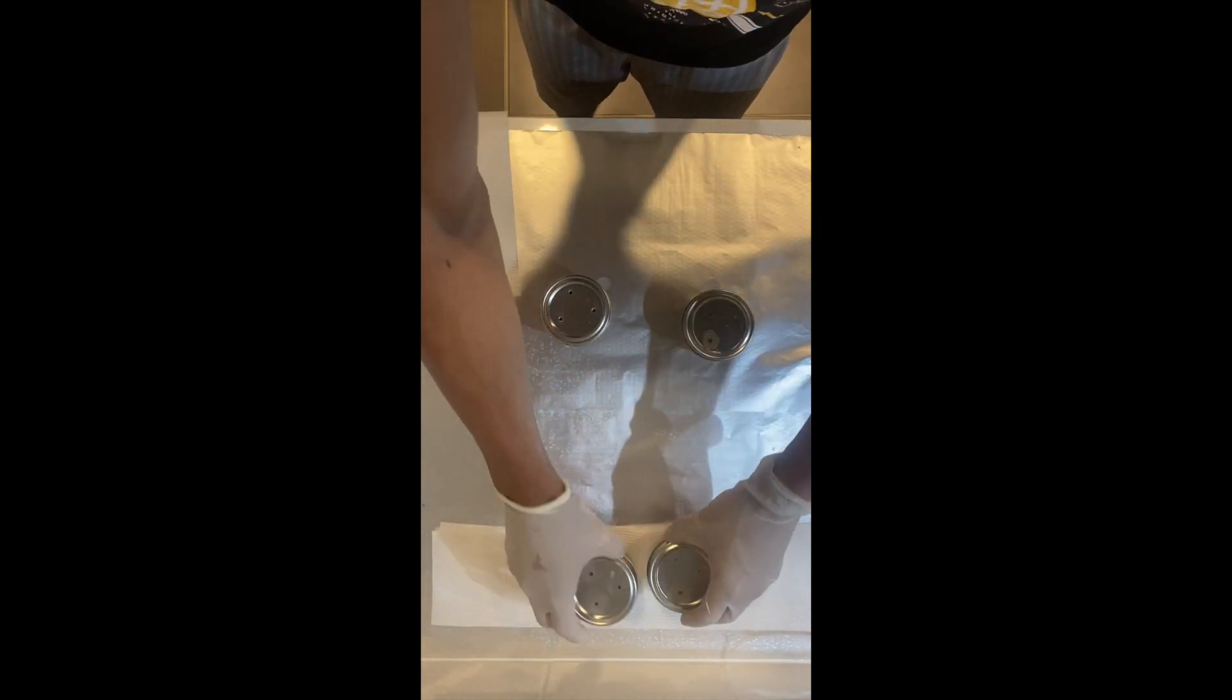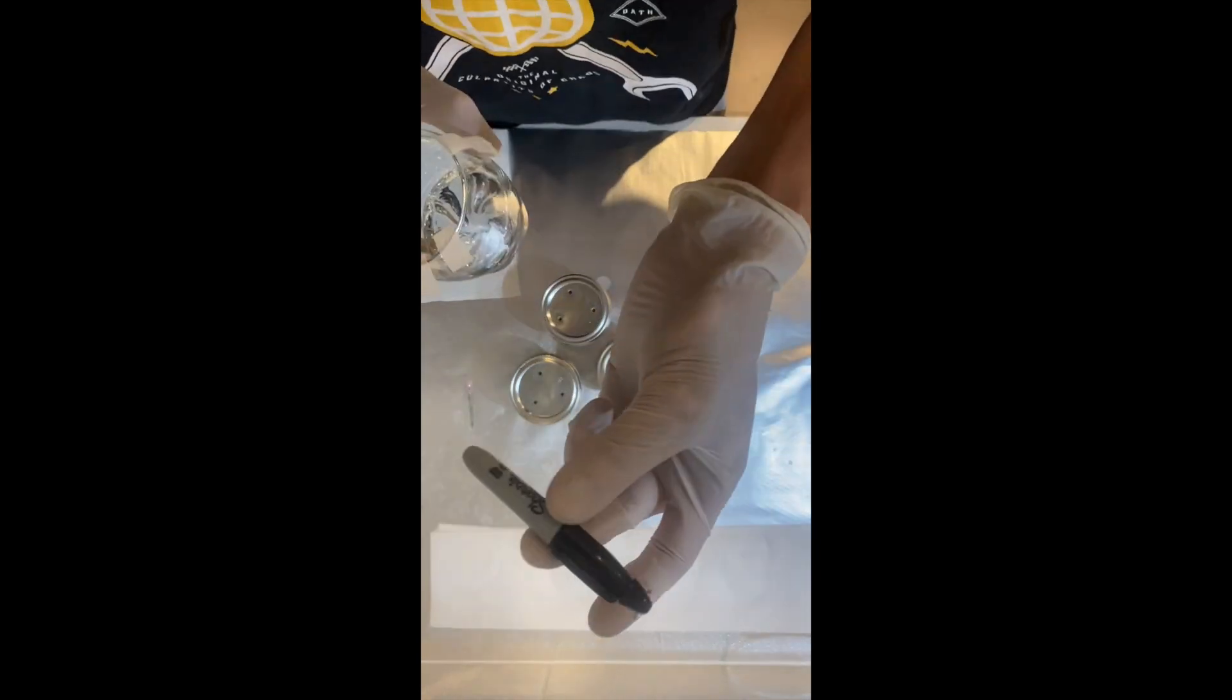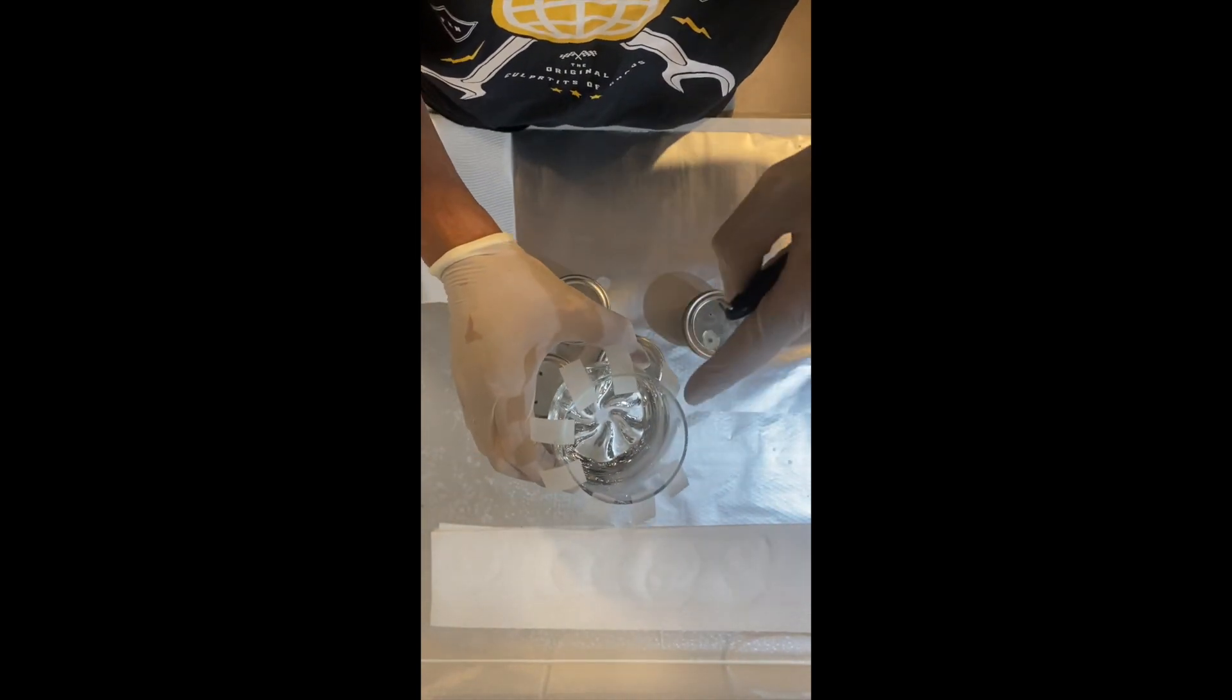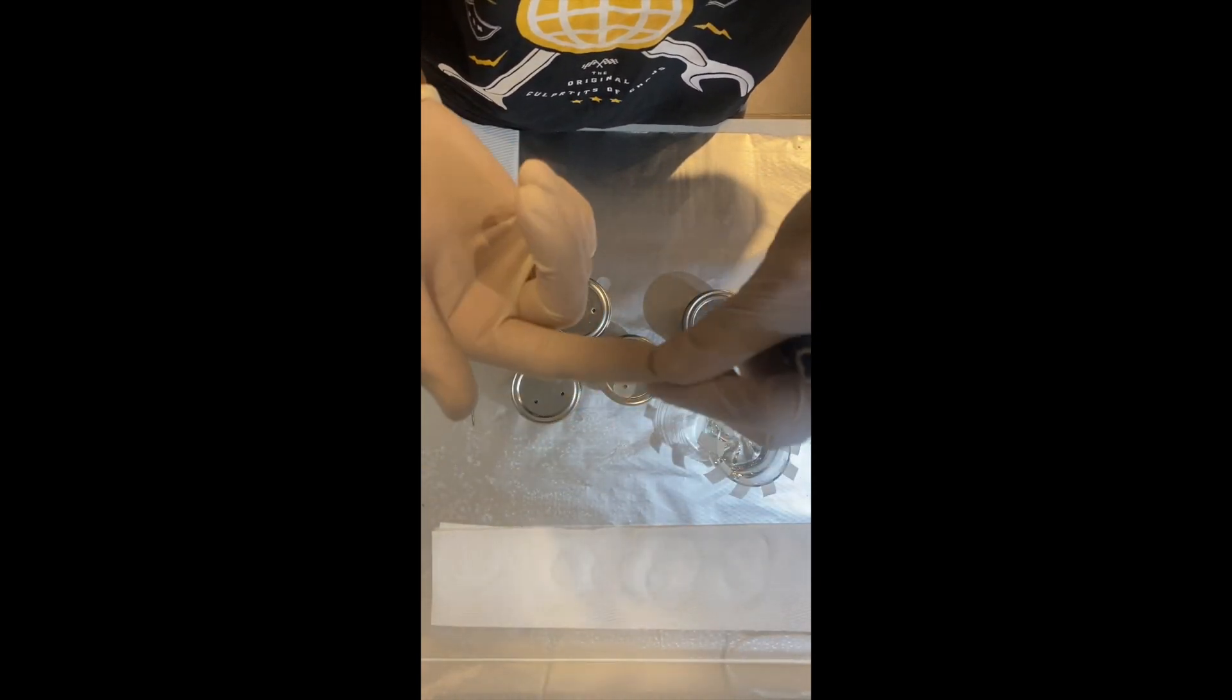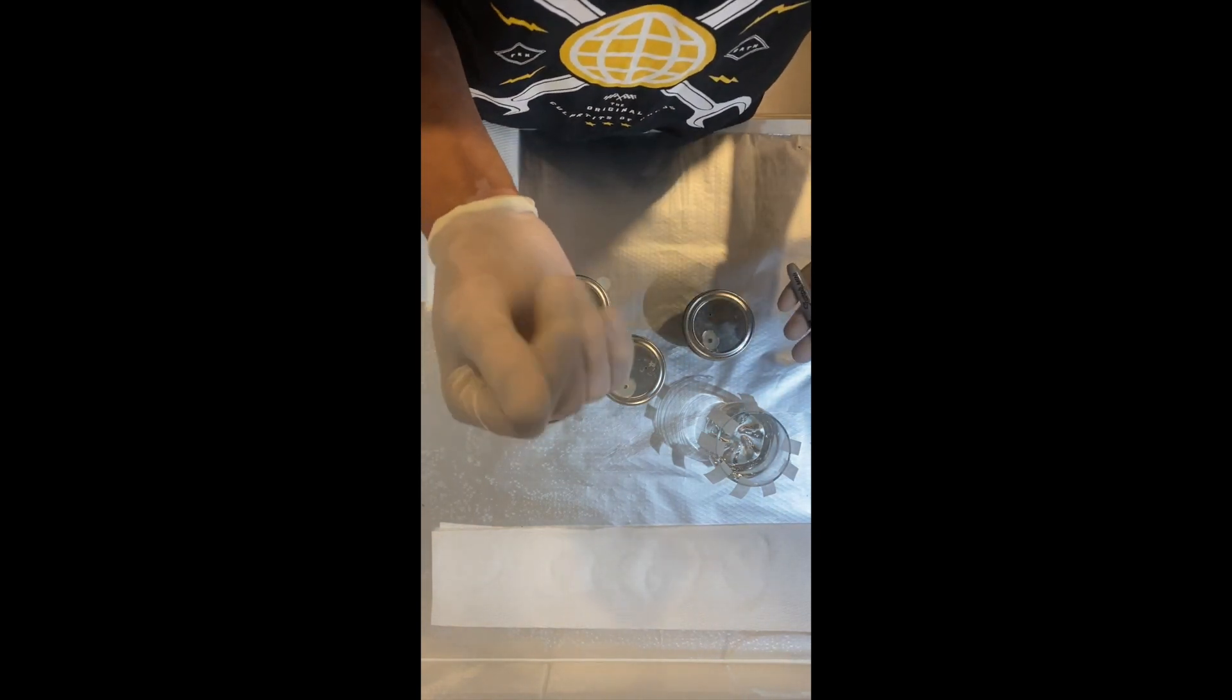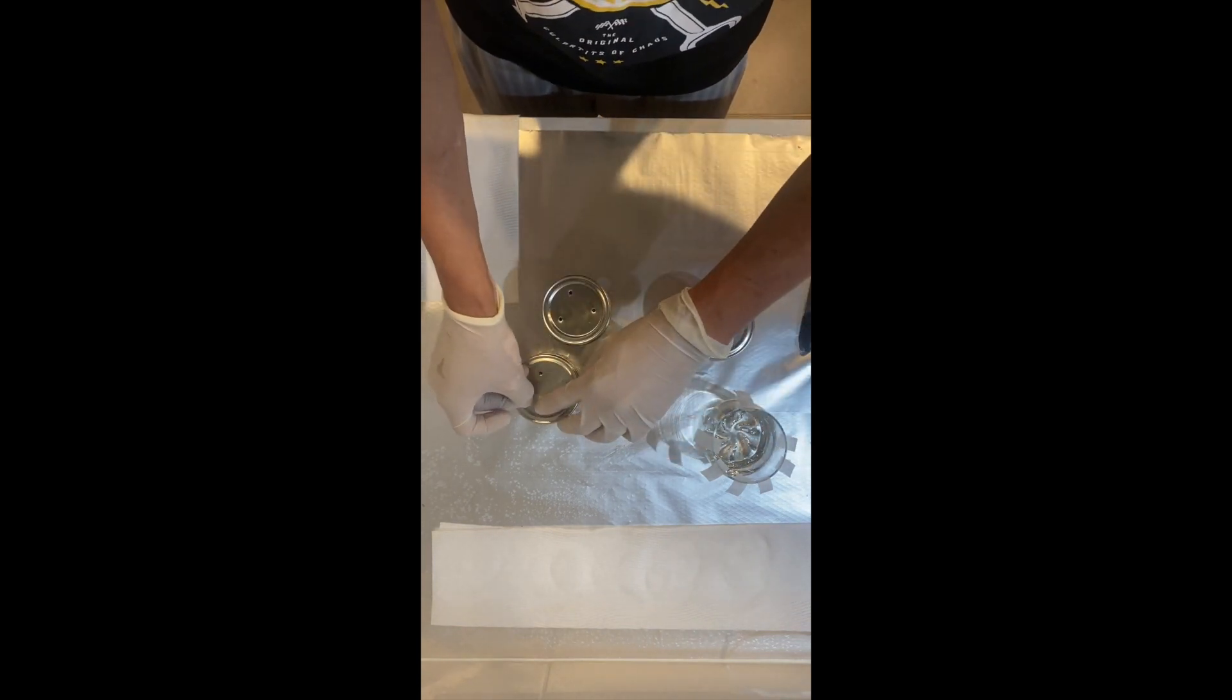Last step. Using our little Sharpie here and our tape that we cut earlier. As I said, it is very difficult to rip off that tape with these latex gloves. You can try if yours is a better cutter than mine. But yeah, so with the tape, we're just going to cover.